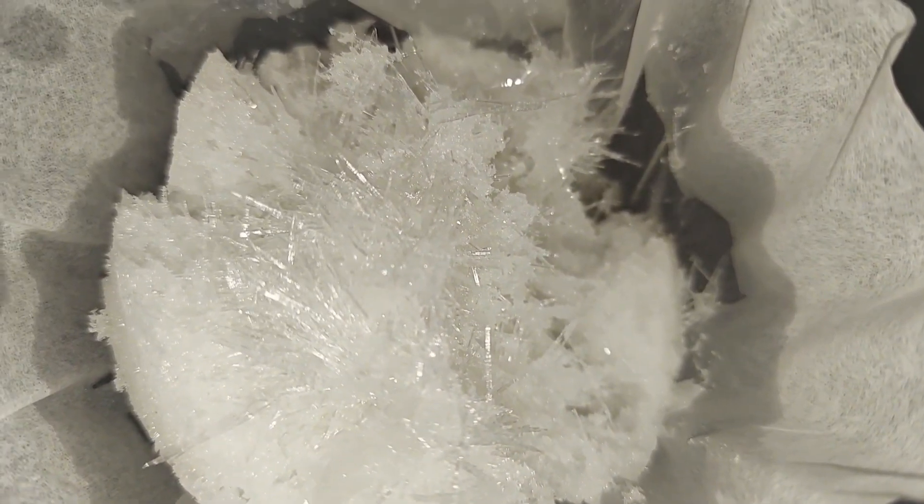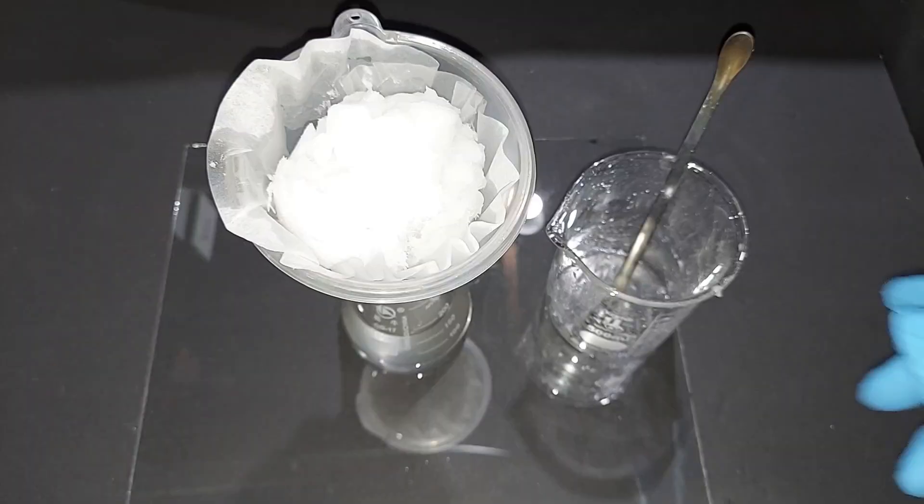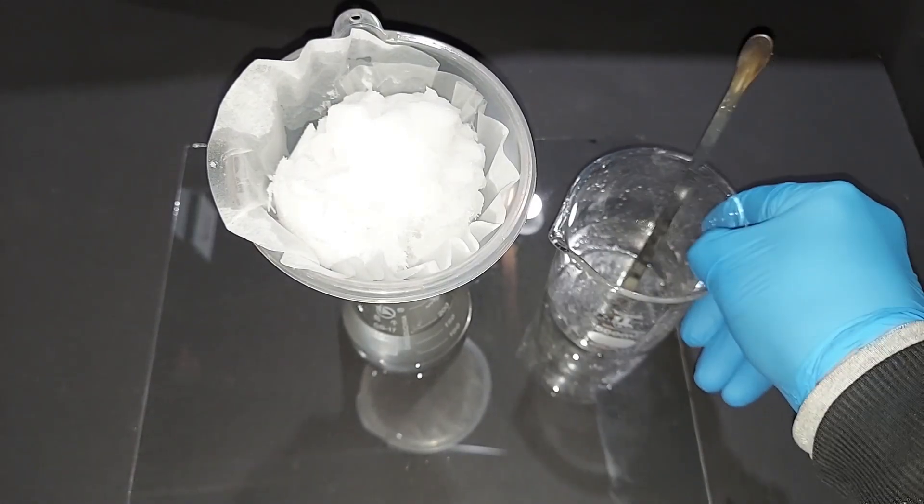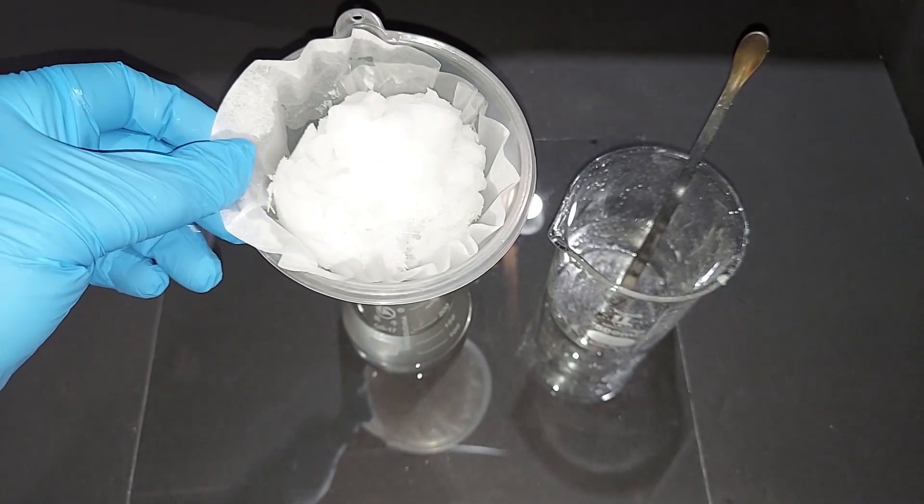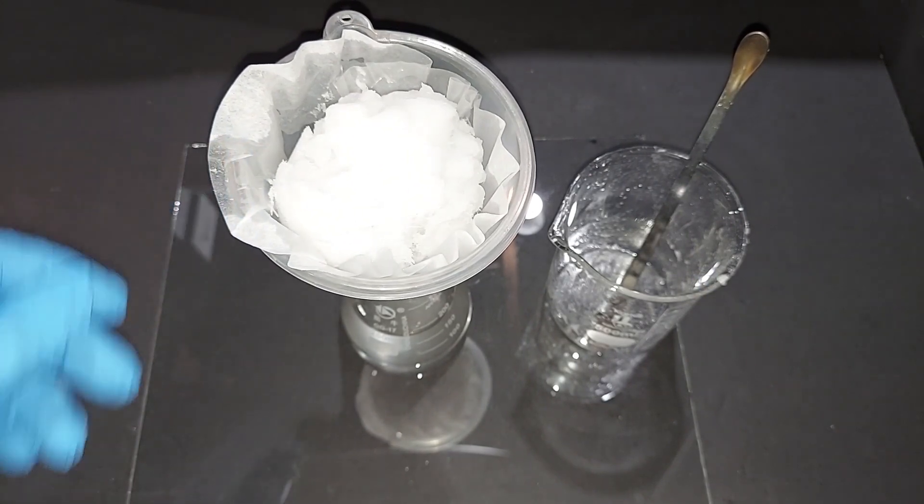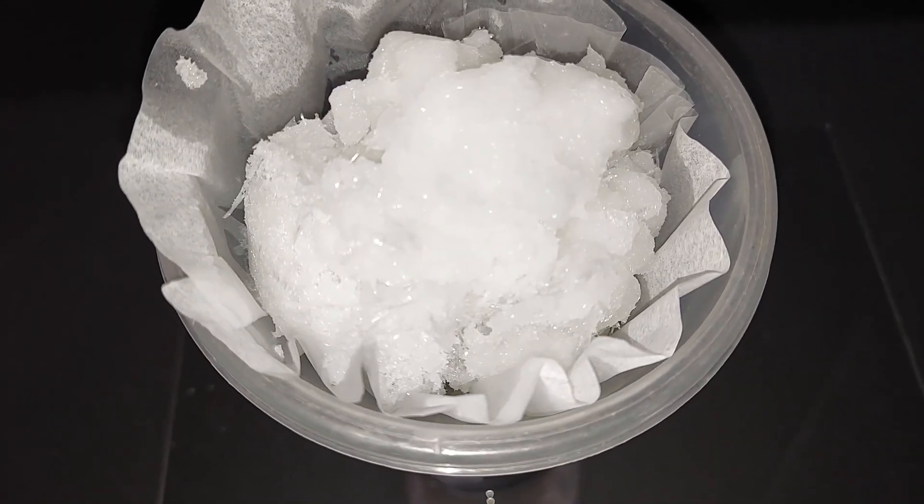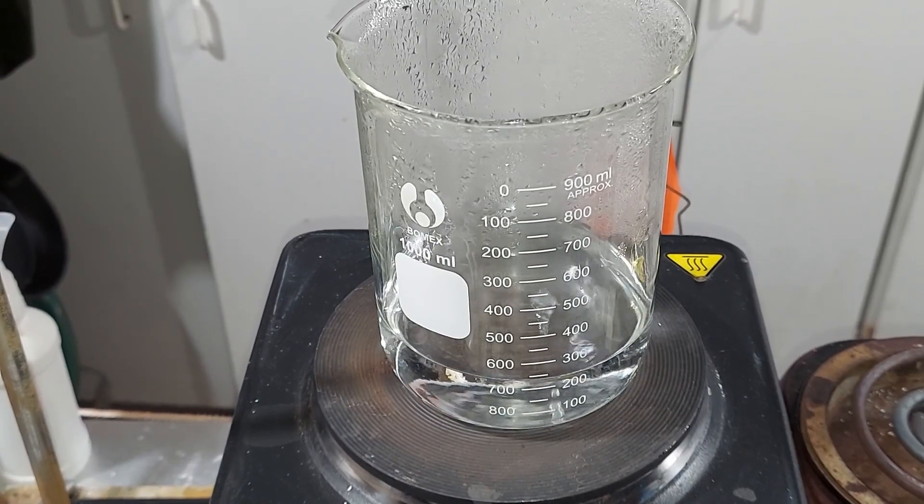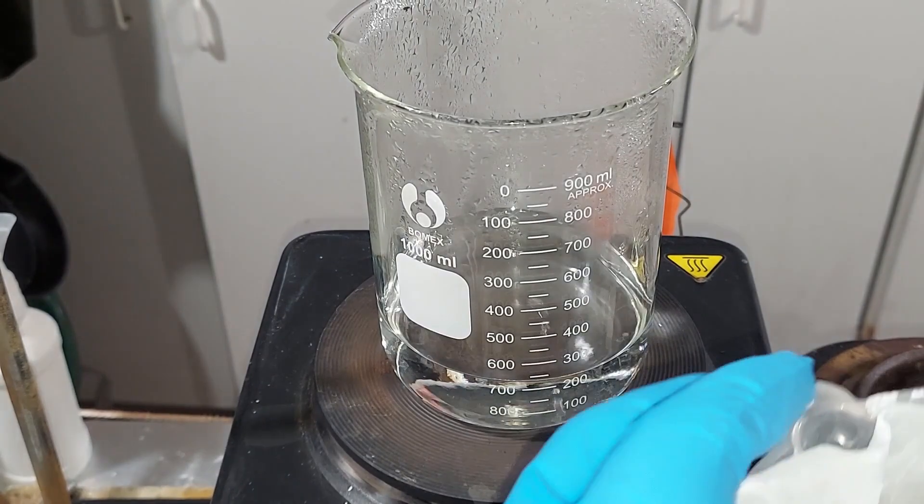There's more in here. I don't know how that happened halfway through the mix here but they're there. Here's a close-up of some of those crystals I was talking about. You can see how they obviously look like needles. I got most of this out in here. There's just a little bit left. I'm not going to worry about it. Next we need to boil some water again, distilled water, and dissolve these crystals in it and do the same thing all over again. I'm gonna let this filter a little bit more here.